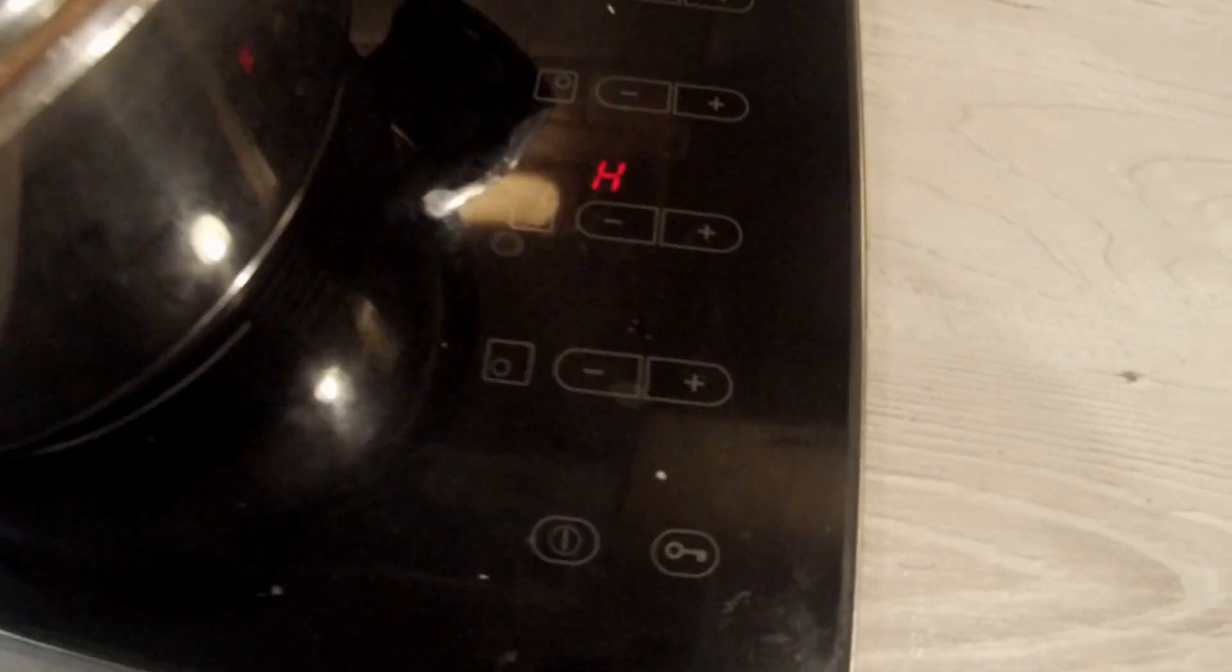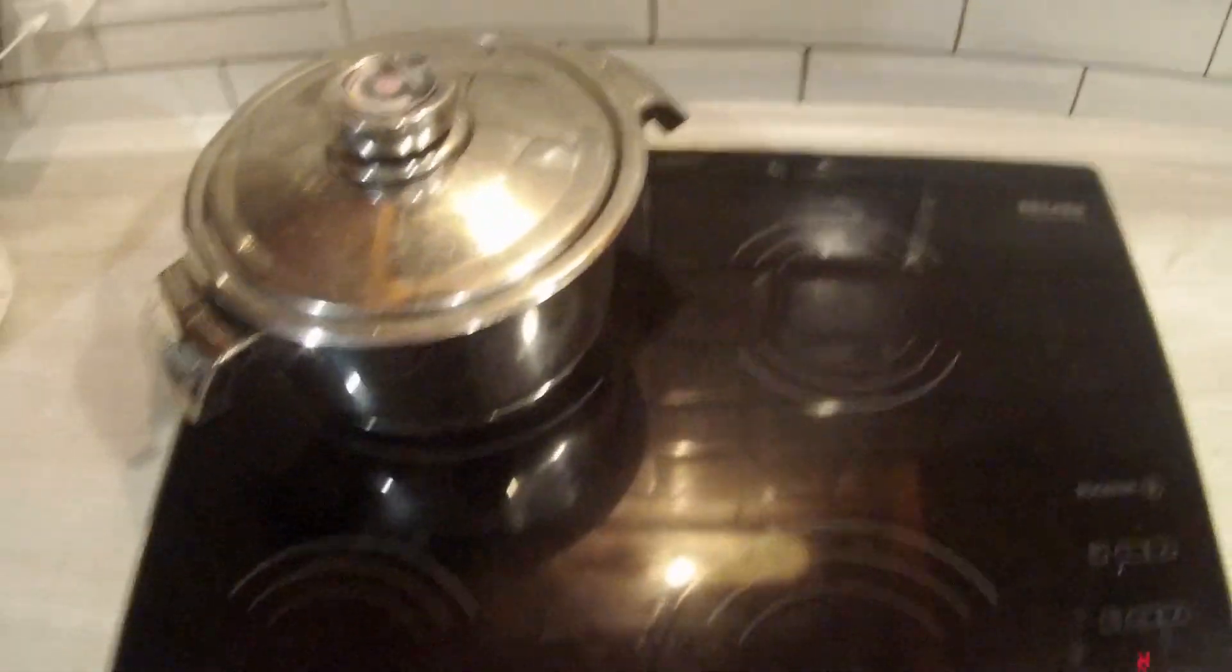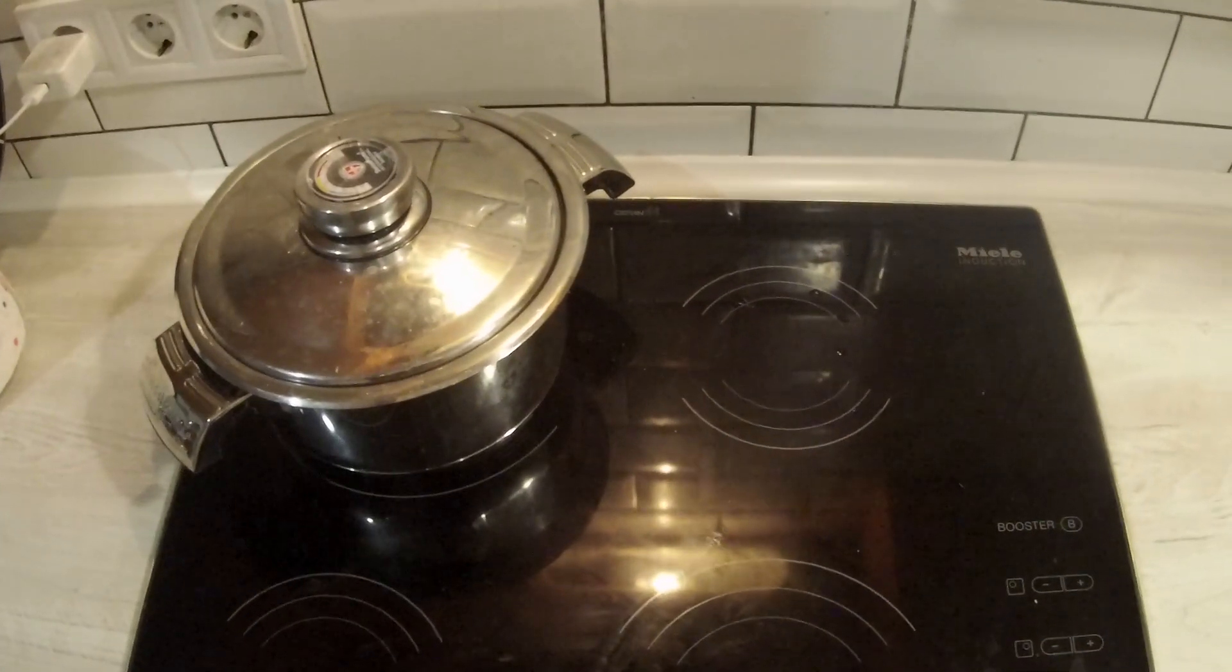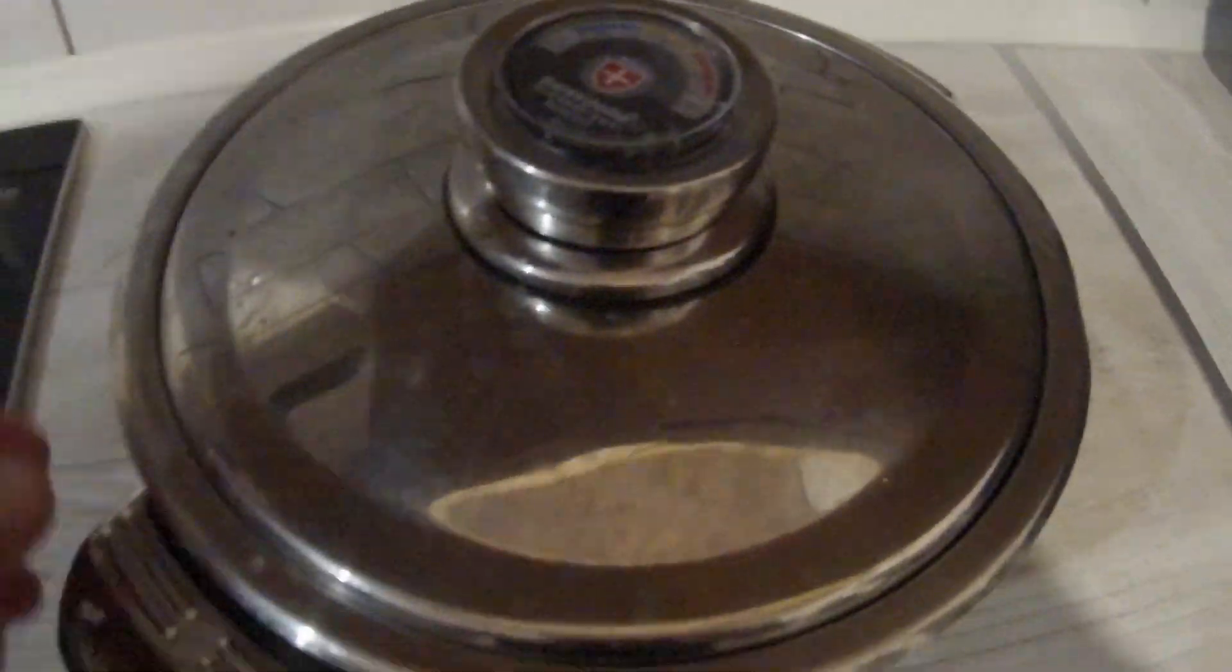When the time is up, we will remove the vials from the heat and let them chill to room temperature. And now when our vials are ready, we can put some life inside them.